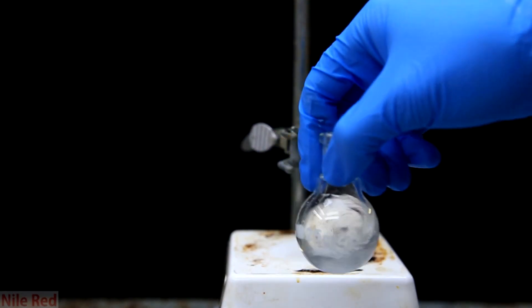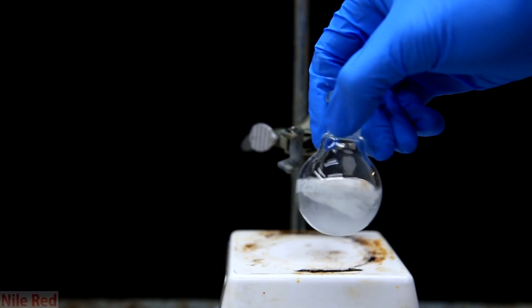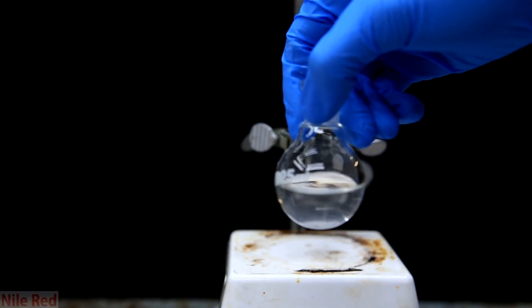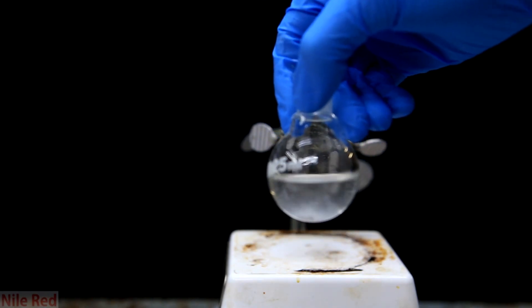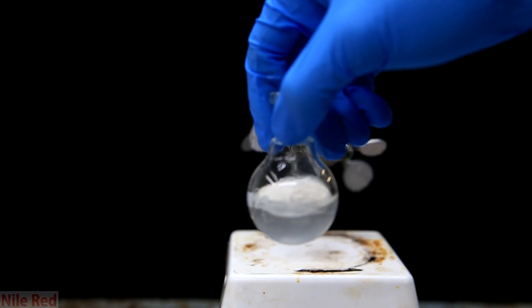You can tell that it's dry when you swirl it around and it appears that there's free floating magnesium sulfate that hasn't clumped together. Generally the water will make it clump together and when it's free floating it indicates that it's dry.